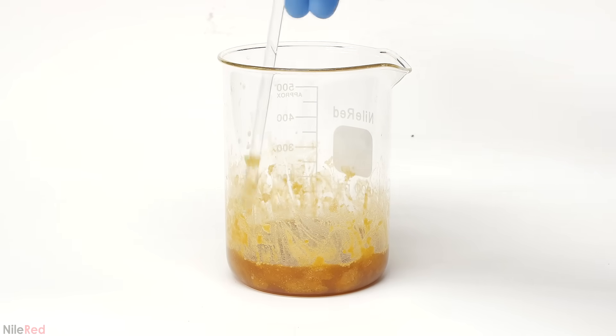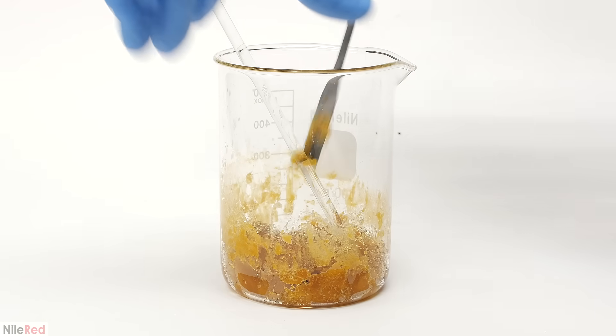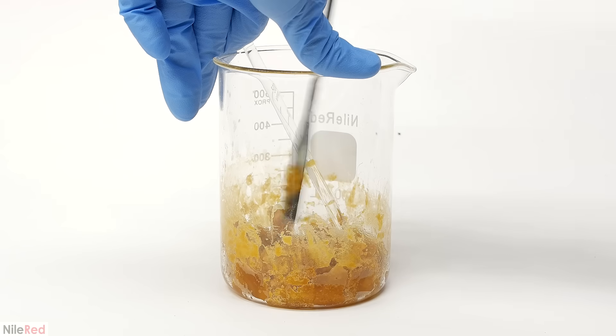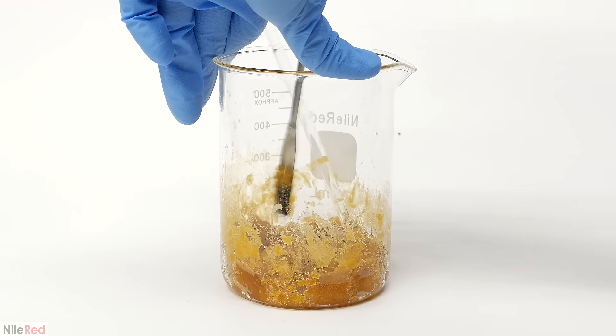I let it sit there for another 20 or 30 minutes, and it became a solid chunk. What I have here is a mixture of potassium nitrate and urea, which I'll have to separate.